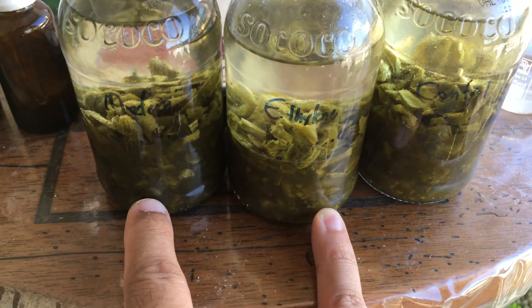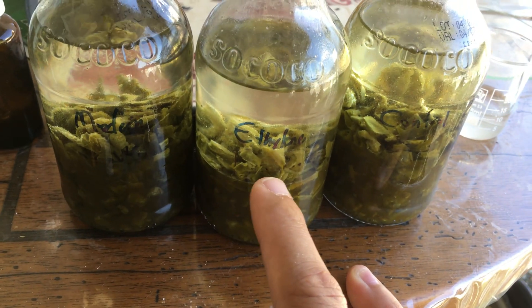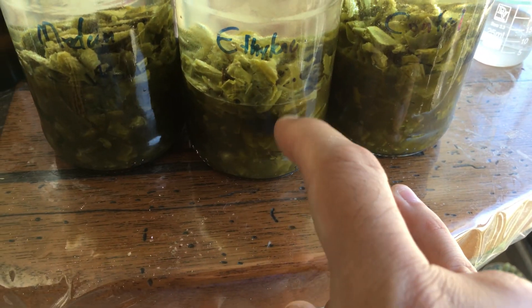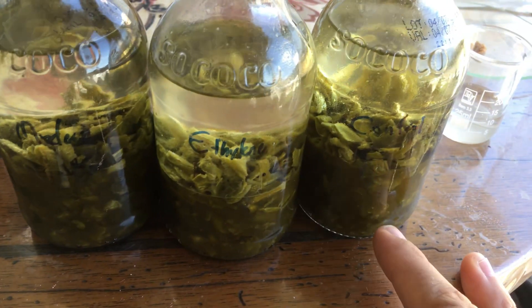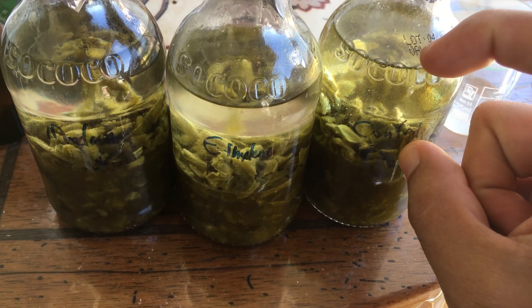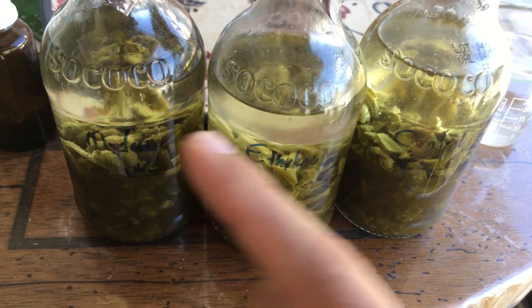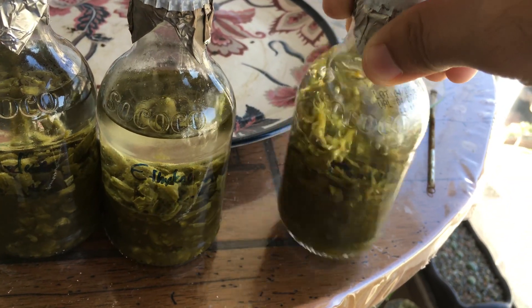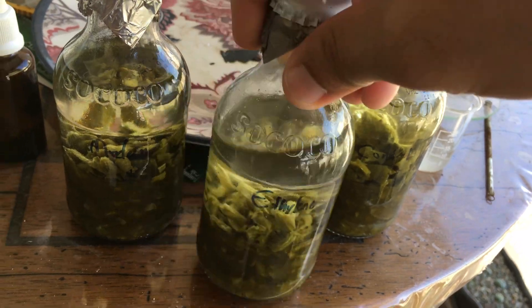After about a day or two soaking in the lye solution, the ethylene had the most bubbling still. I'm not sure if it's still the acids neutralizing or not, followed by the product, and the control had no bubbling. Today I decided to add 100 milliliters of the solvent. I used xylene — I just added the 100 milliliters and swirled it a bit. I'll leave this for a few days pulling.